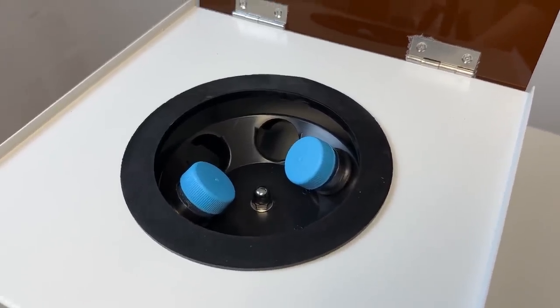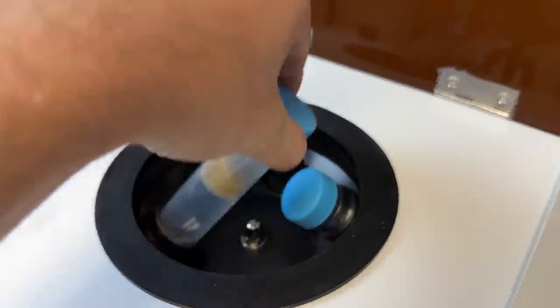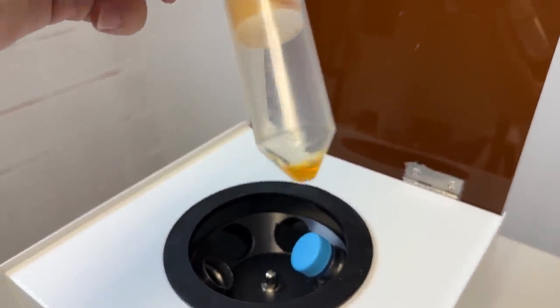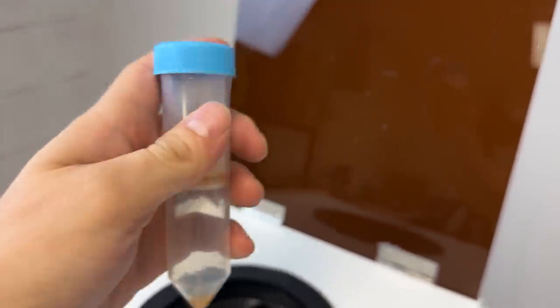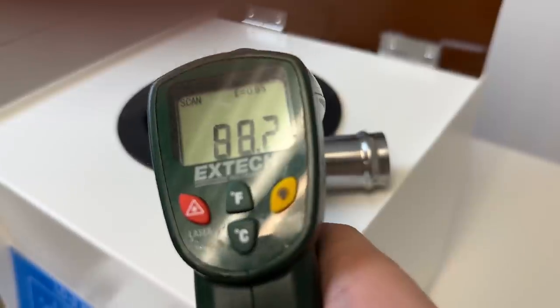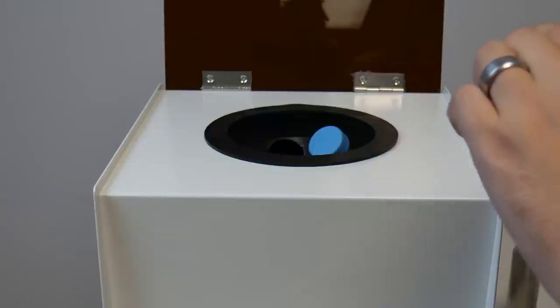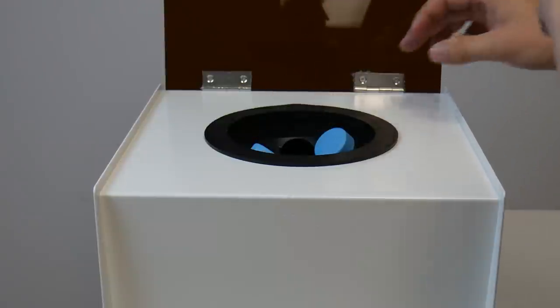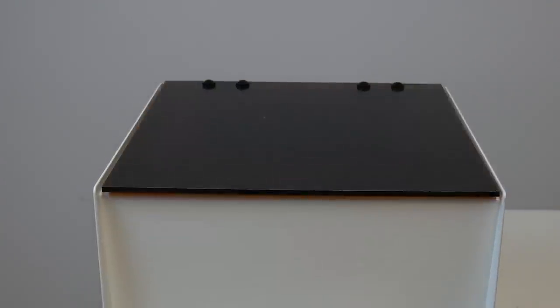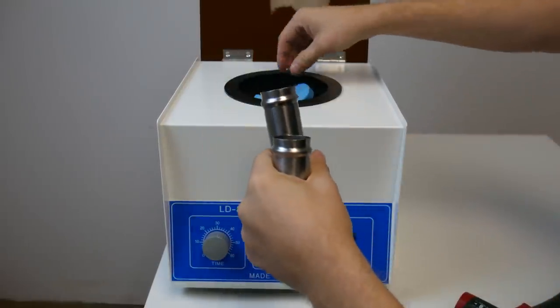So after about 20 minutes, that's just the timer, sorry about that. After about 20 minutes, let's see how it looks. So we've got some terps pulled through. It's at the top there and it's getting warm already. The tube's sitting at about 85 degrees. That's warmed up a bit. It's not that hot though so I'll let that keep going for a bit before I switch it out. I don't know, I'll switch it out now.